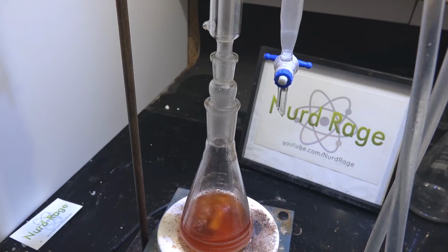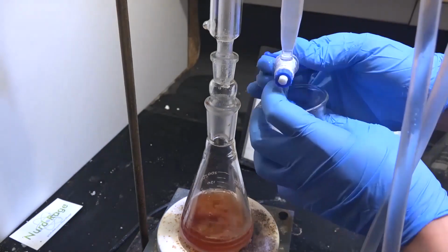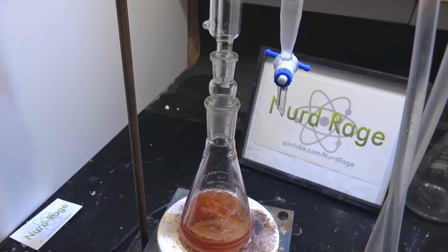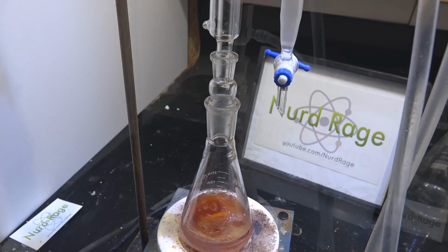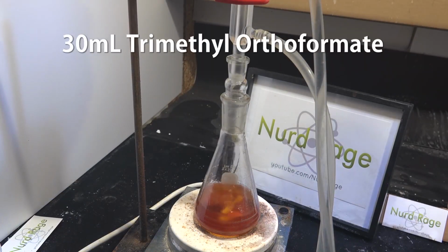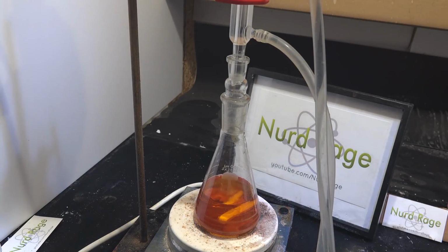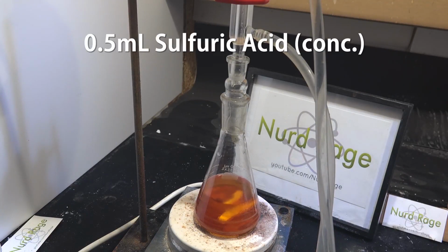What we're doing is removing the water in the mixture by distillation. Water forms an azeotrope with toluene, and the Dean-Stark apparatus lets us separate the toluene from the water and return the toluene to the mixture, continuing the cycle. Now remove the Dean-Stark apparatus and assemble back on the reflux condenser. Through the top of the condenser, we add in 30 milliliters of trimethyl orthoformate. Then we add in 75 milliliters of methanol that was dried over molecular sieves. Finally, we add in 0.5 milliliters of concentrated sulfuric acid that I distilled from drain cleaner.